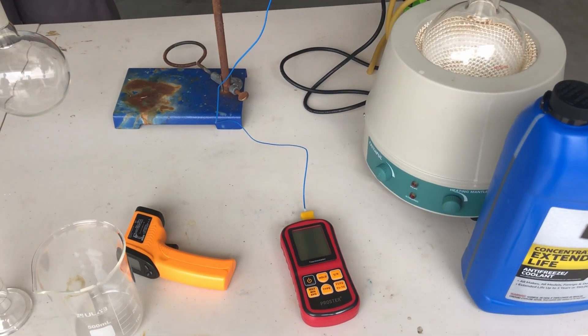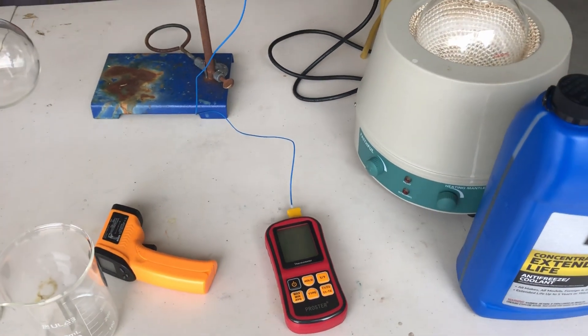Now we're going to move on over to the second part of this video and make dioxane. This one is 1,4-dioxane, and you might be thinking, oh, that's just making a solvent, it's not that bad. But I don't want to work with the tar. The tar that 1,4-dioxane leaves behind is not fun. Nobody likes it, and that seems to be what everybody hates about the synthesis.